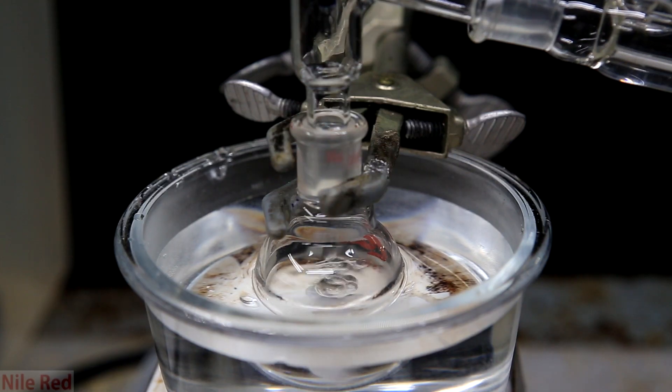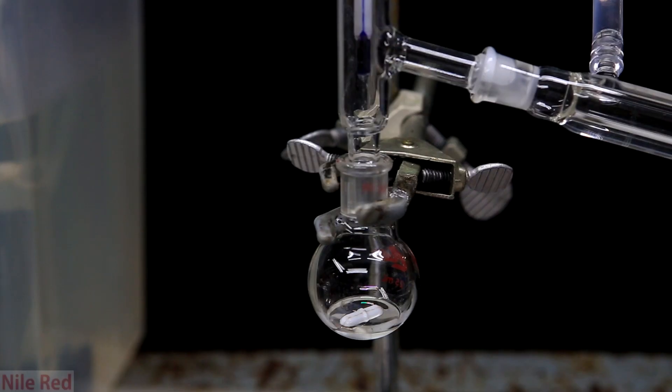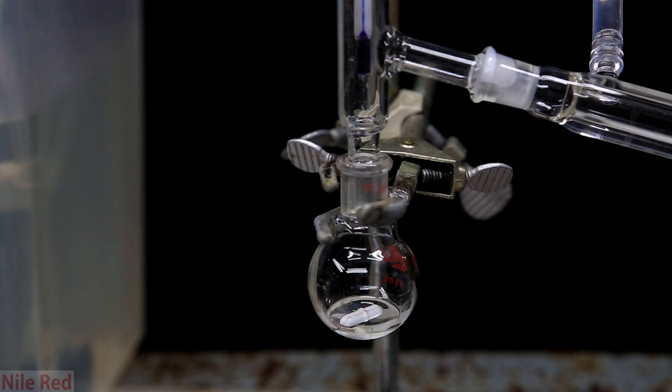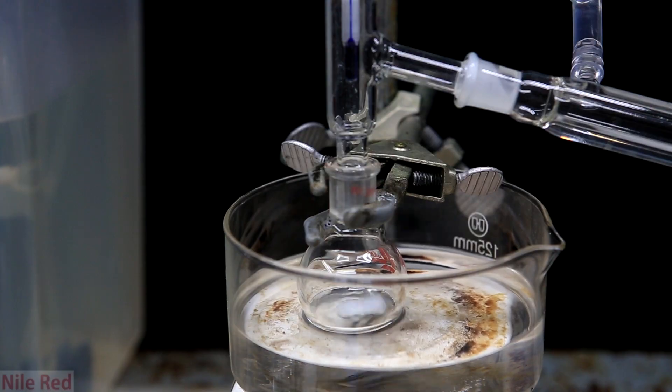So the ether pretty quickly comes to a boil because it only boils at around 35°C. After the ether is gone we're left with a little bit of product but it's not enough to actually distill it. If we tried to most of it probably wouldn't make it through the distillation apparatus.